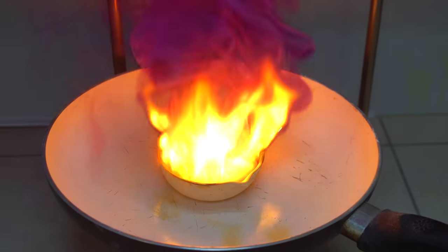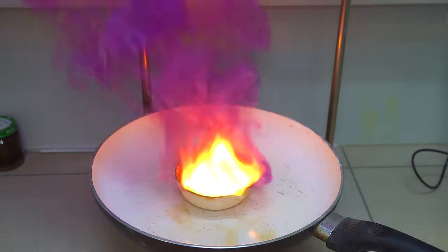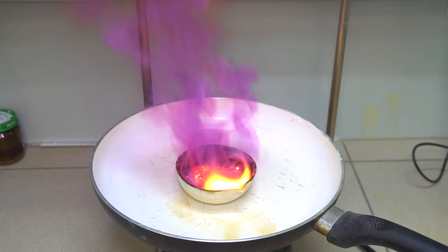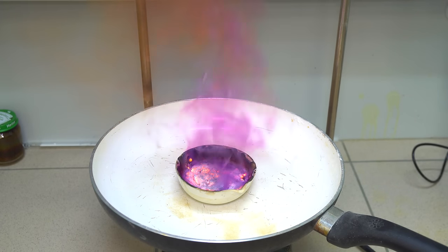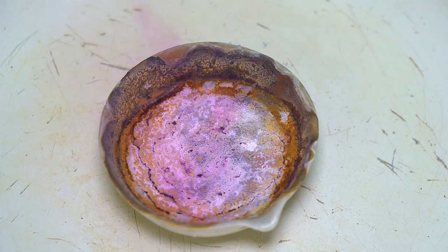In this reaction, as well as in many other reactions with iodine, there forms a cloud of iodine vapor, which is so hard to stop looking at, even for experienced chemists. By the way, a small portion of this cloud settled on the hood's walls, leaving striking stains. But that's ok, because just a few hours later, such stains disappear on their own, because of elemental iodine's high volatility.